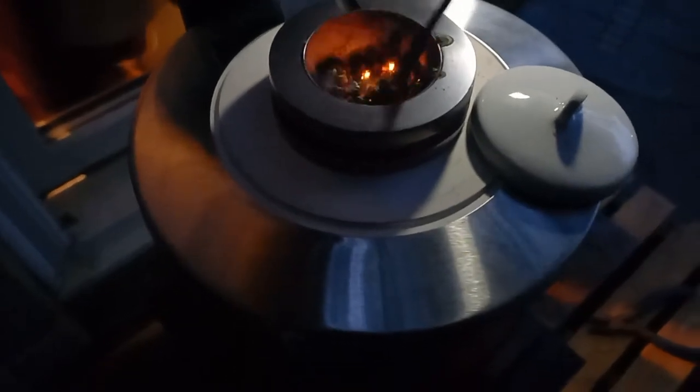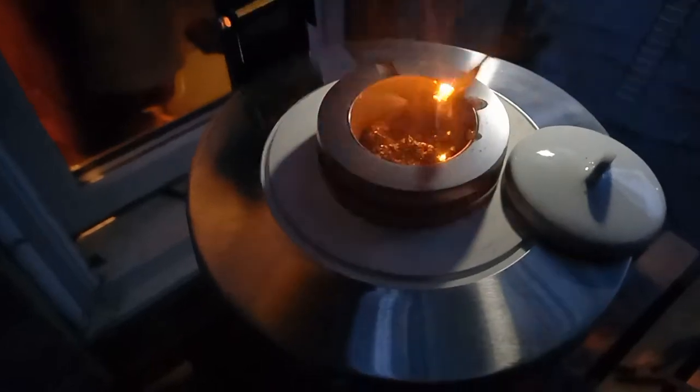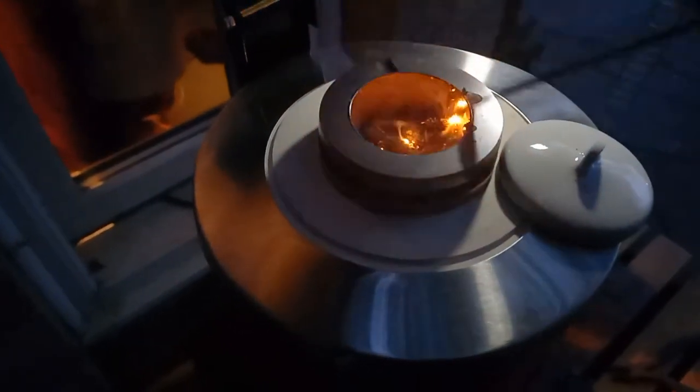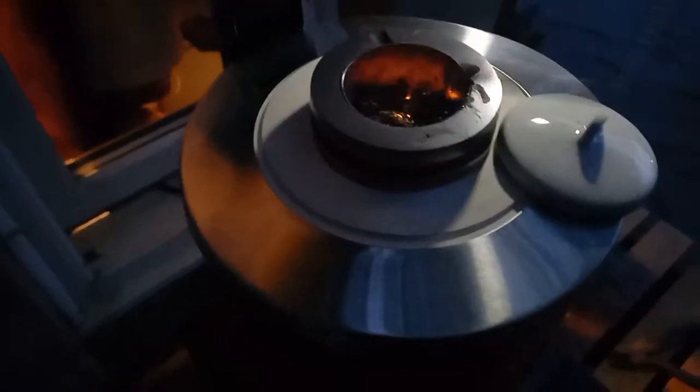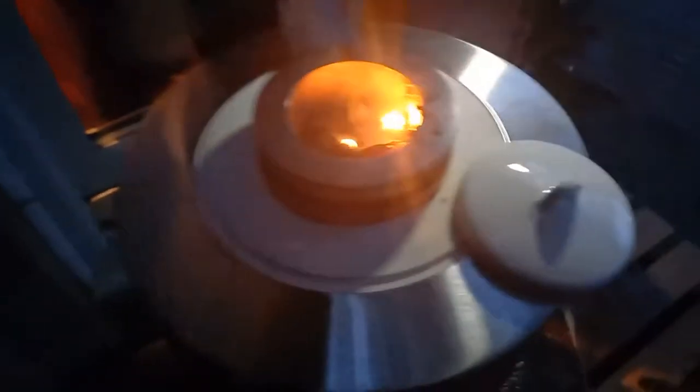I'm not sure what's happening. There's something reacting there — this is not what I was expecting. It's going to be hot. Deprived of oxygen. Okay, everything's like red hot. I think it may be too hot, I don't know.